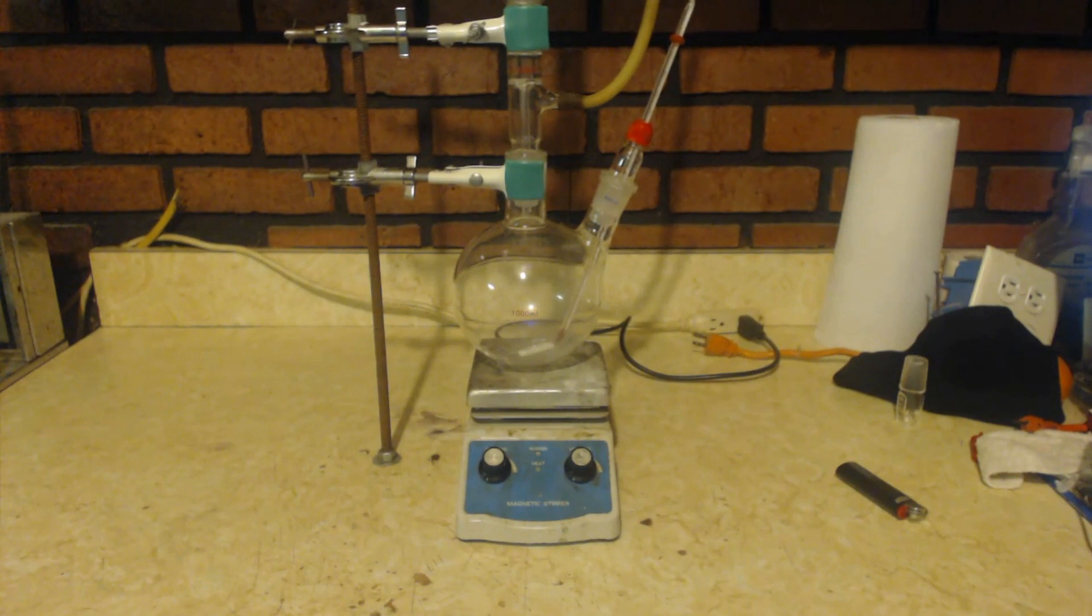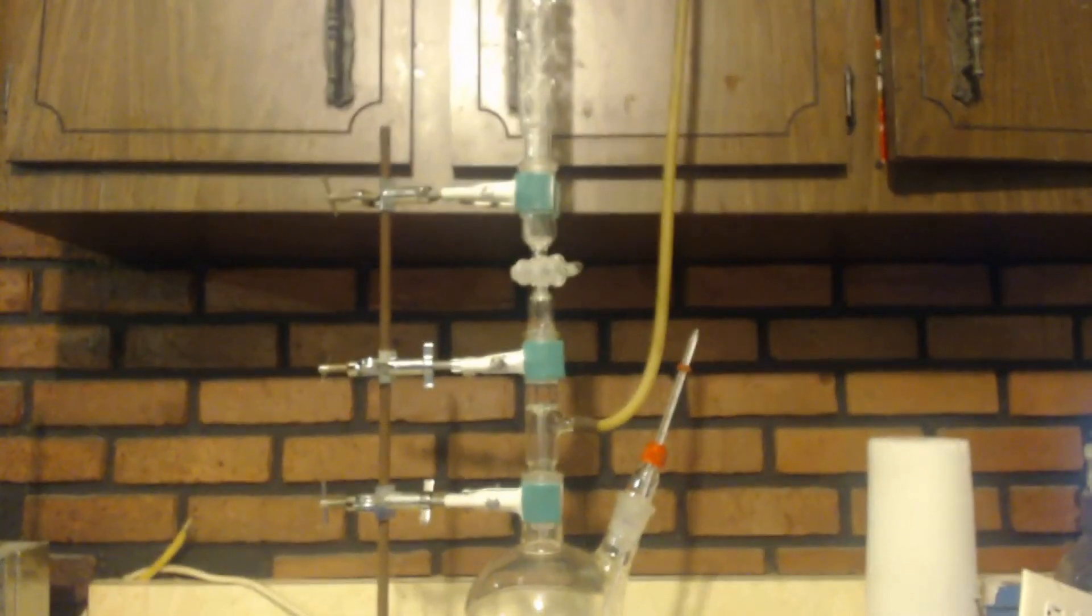The reason I'm showing you my apparatus first is because I broke my equalizing funnel. So I had to build one from the parts I have. And this is basically how I did it.